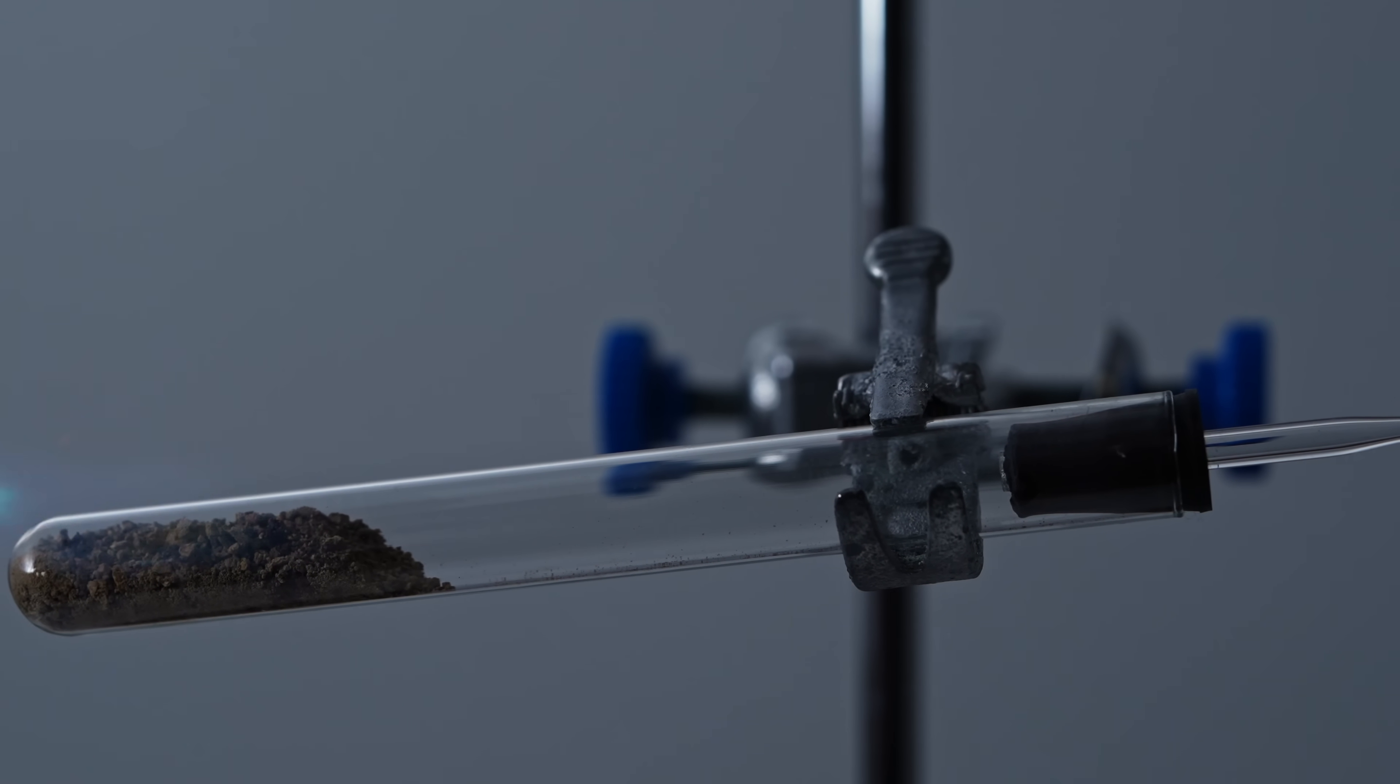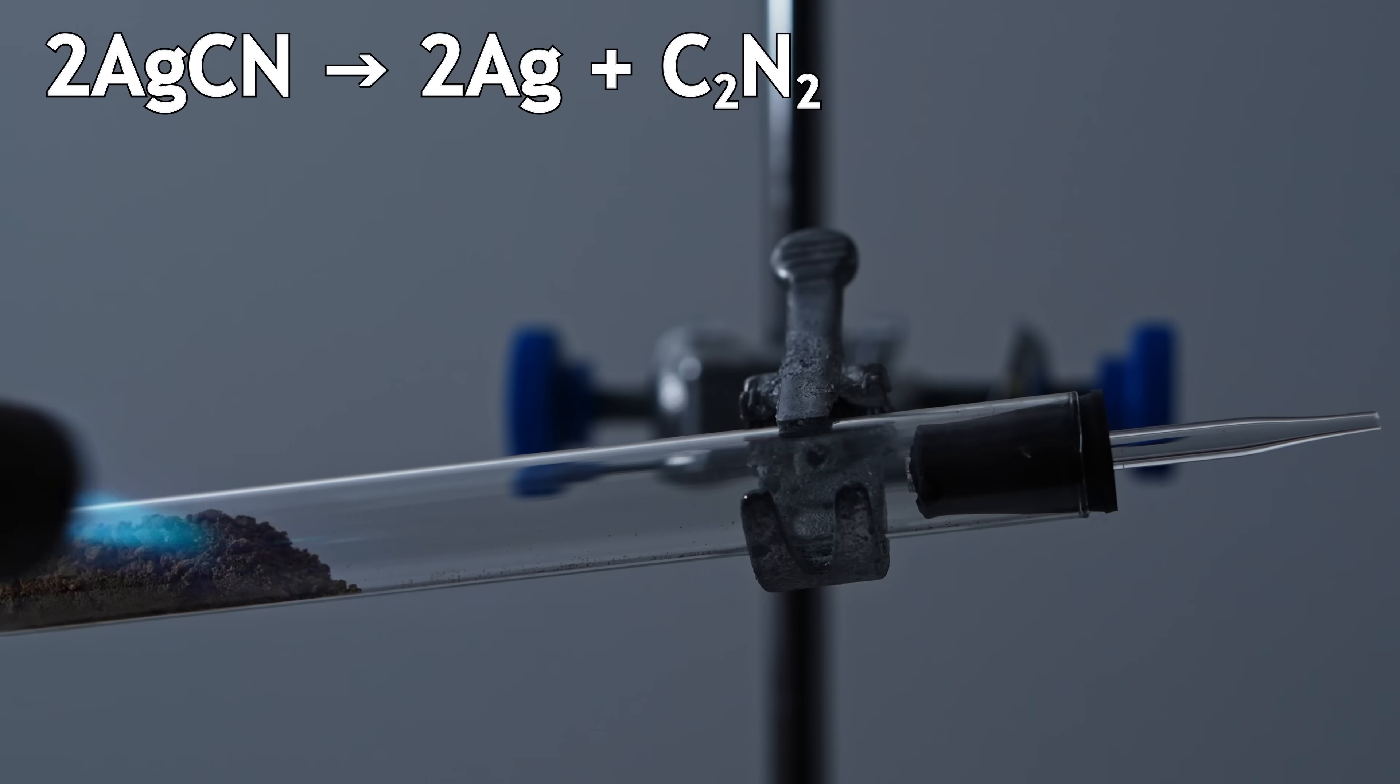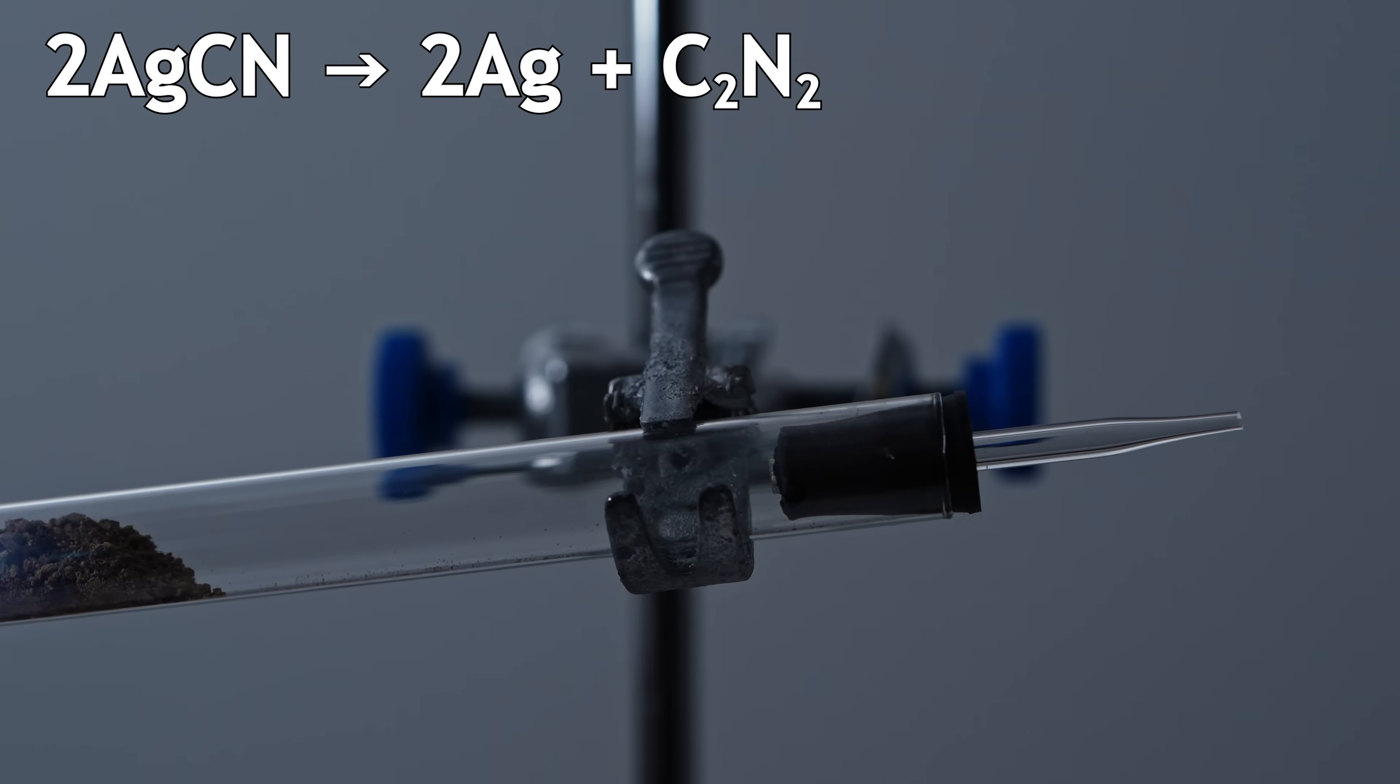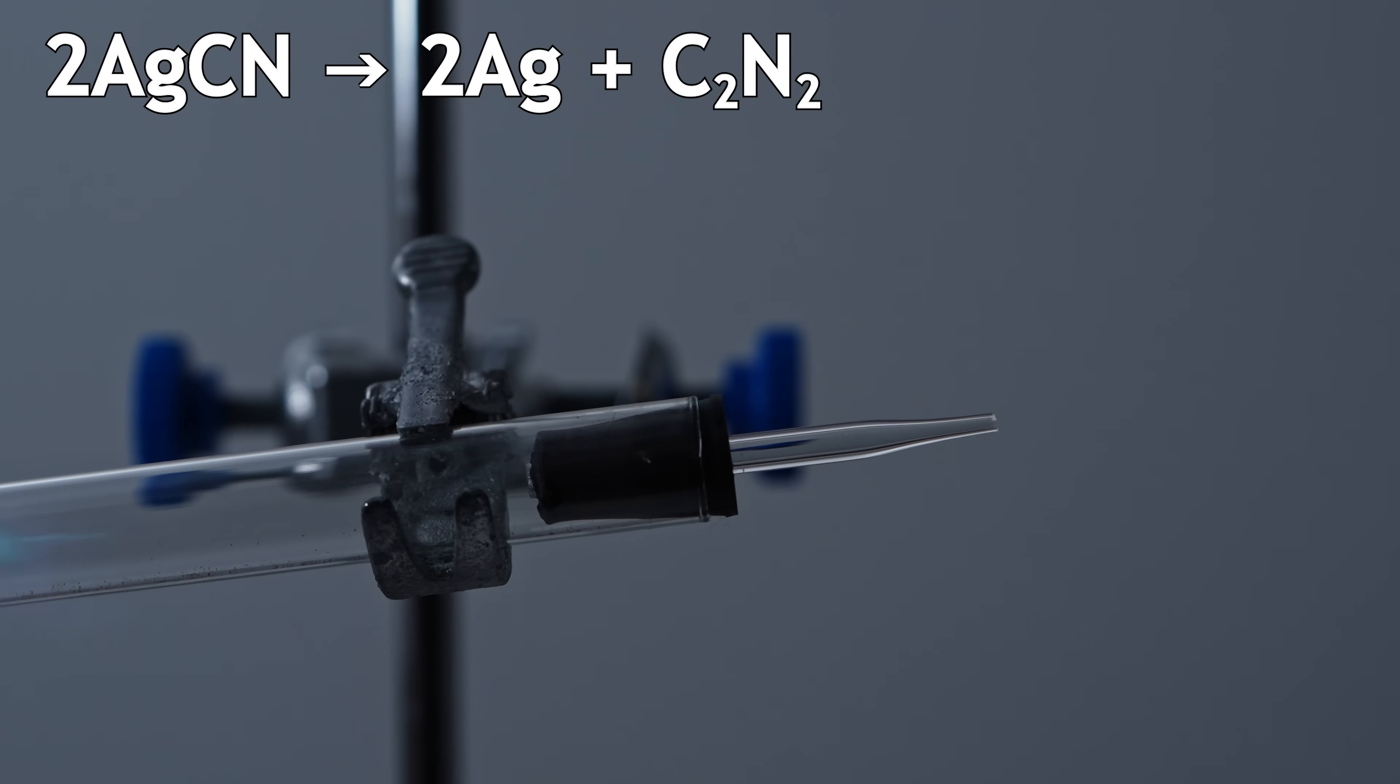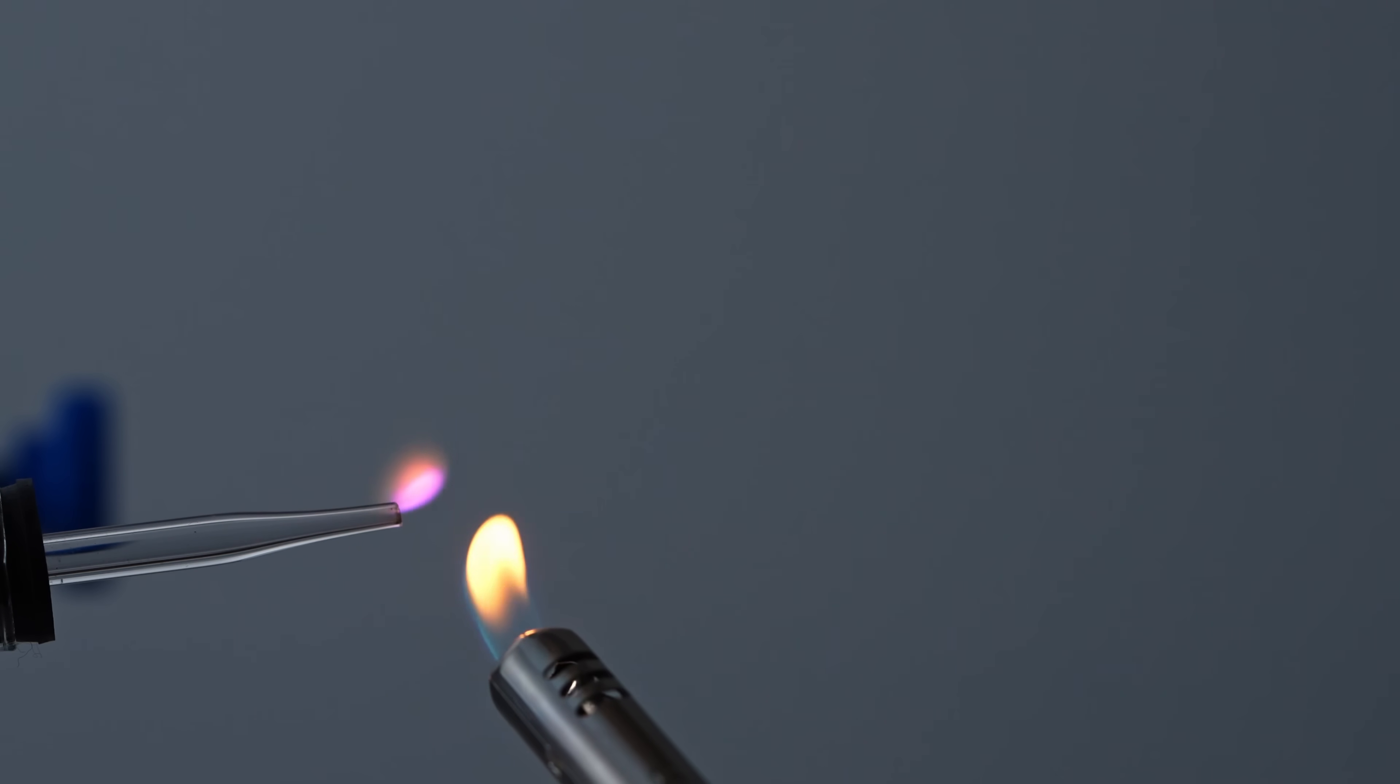The flame of burning cyanogen should have a deep pink color. Let's check it. I replaced the rubber stopper to make it easier to light, and now I'll bring the open flame to the end of the gas outlet tube. Yeah, the color of the flame of burning cyanogen really has a rich pink hue, which, due to the heating of the glass tube, quickly turns orange because of the sodium ions present in the glass.